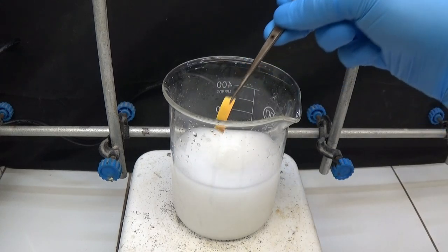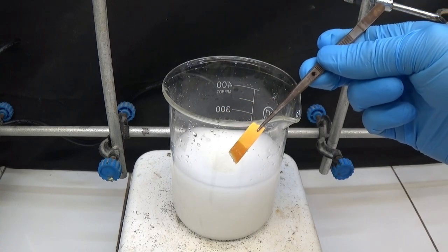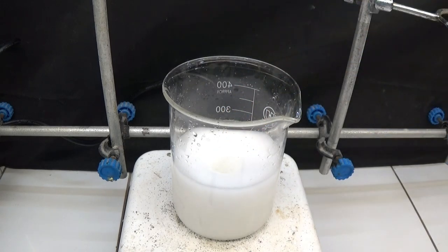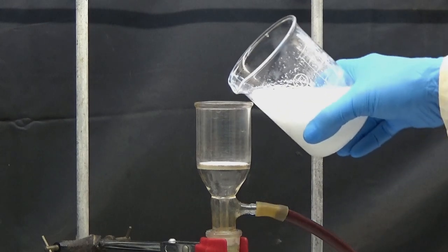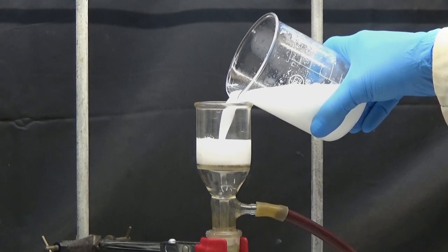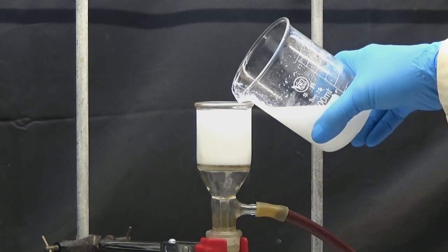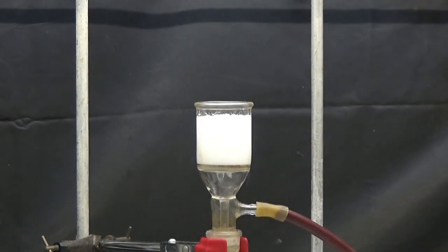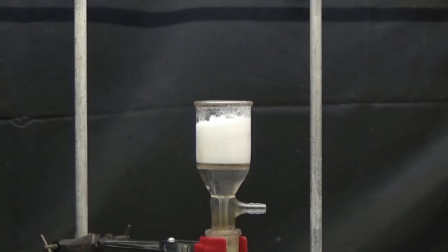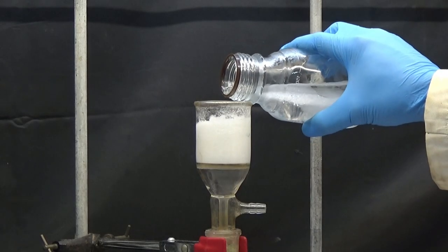The white precipitate is pure phenylacetic acid. Collect the solid by suction. Wash twice with ice water.